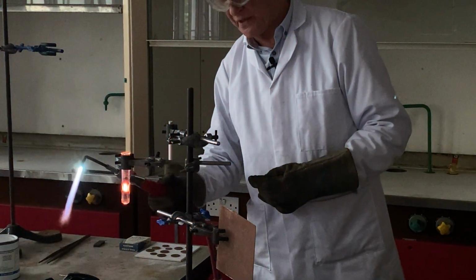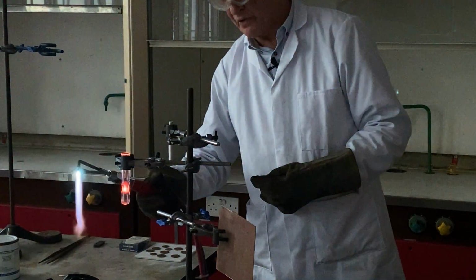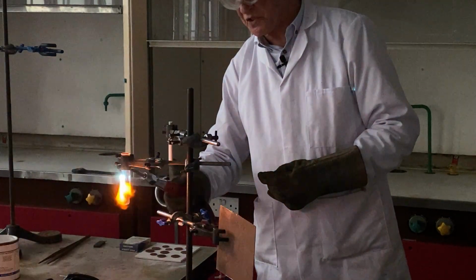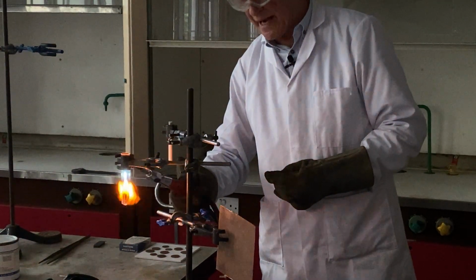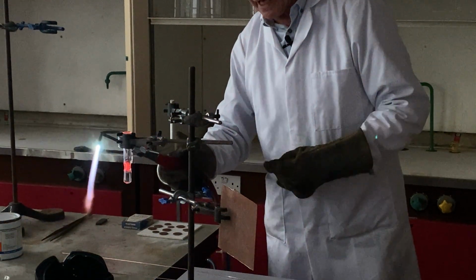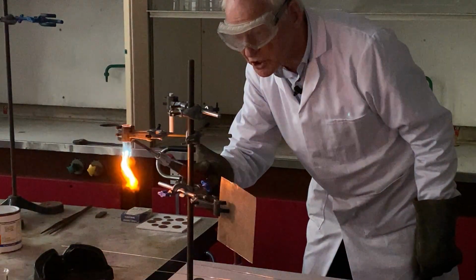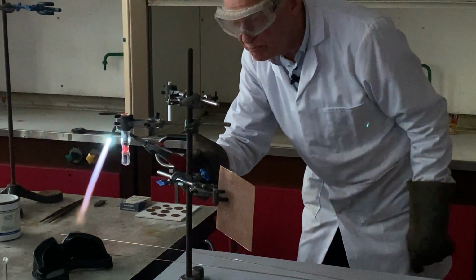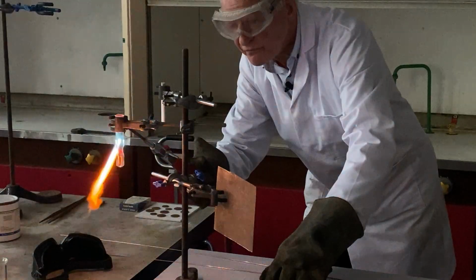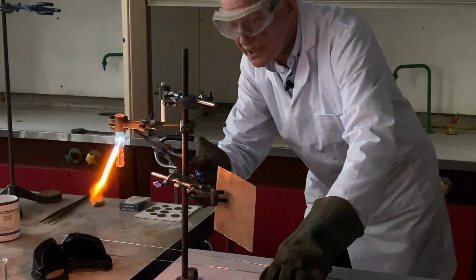However, you see already, it's beginning to be deformed. This is what we call plastic deformation. The glass is now, gradually, the neck is beginning to get thinner and thinner. And at a certain point, which I'm going to try and judge carefully, the bottom of the glass should fall away and fall maybe a few centimeters.